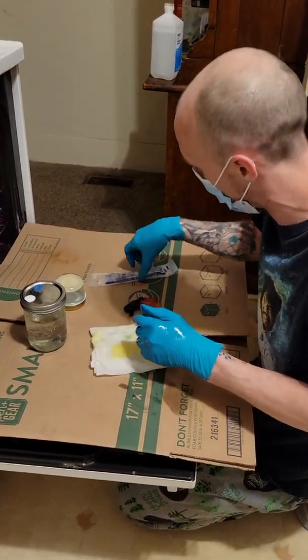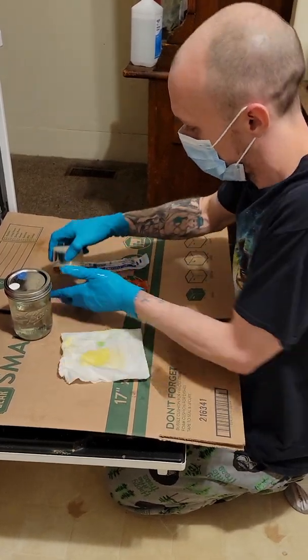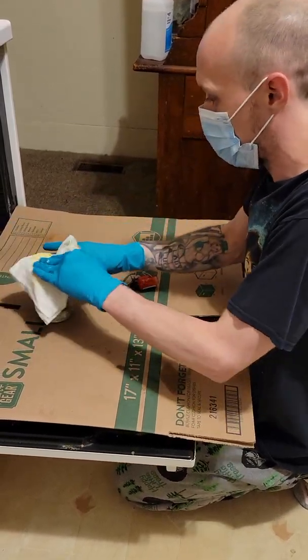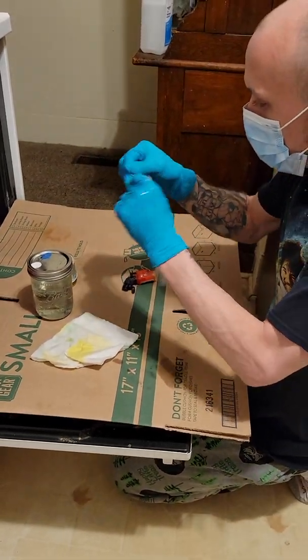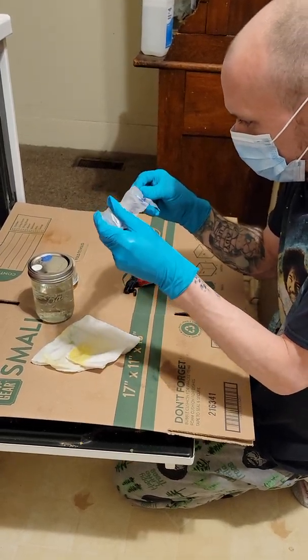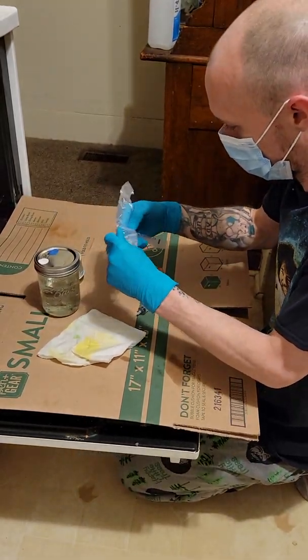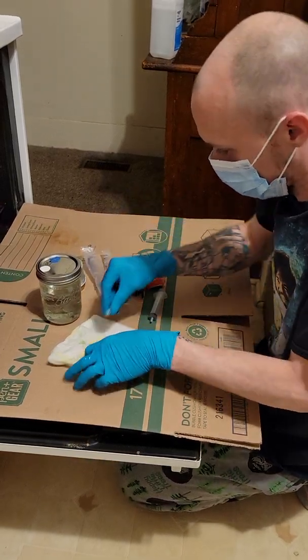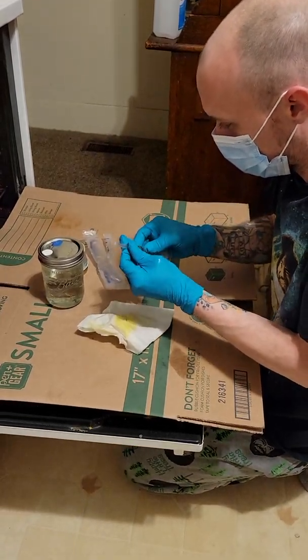What we're doing today is I'm going to make a liquid culture using my Z-Strain. We'll get that semi-open. Wipe the top of that off. Get your clean, unused needle — that I just broke. Wipe that off. Wipe that off.